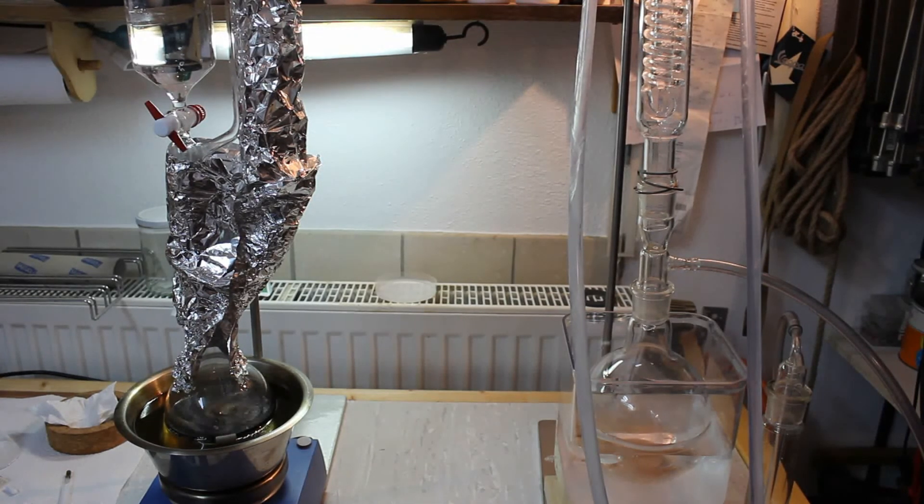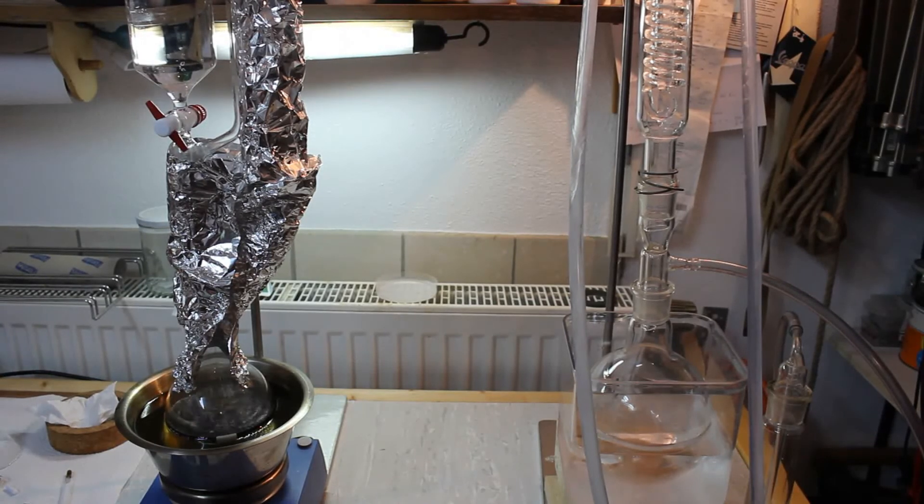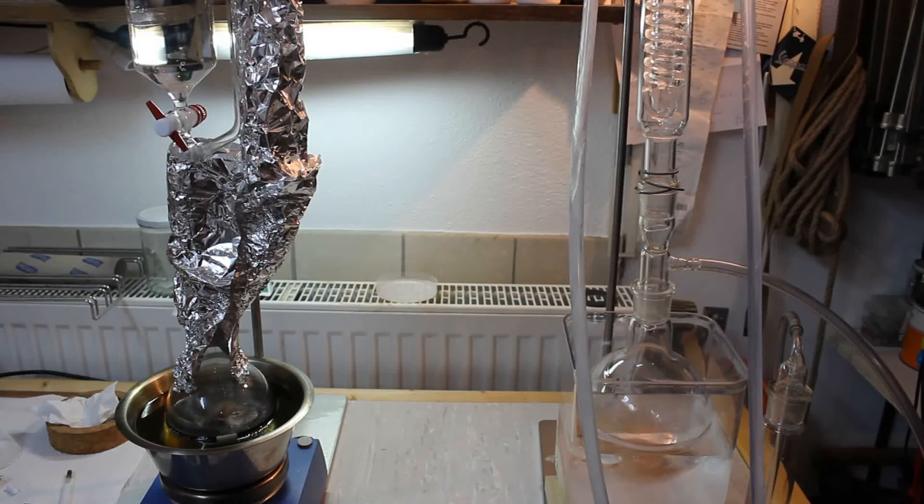We are collecting diethyl ether at a pretty constant drip rate now and I've opened the addition funnel to adjust the same drip rate of ethanol into the reaction flask as we are collecting ether. I started out with 300 milliliters of ethanol in the addition funnel and I think this should be enough.